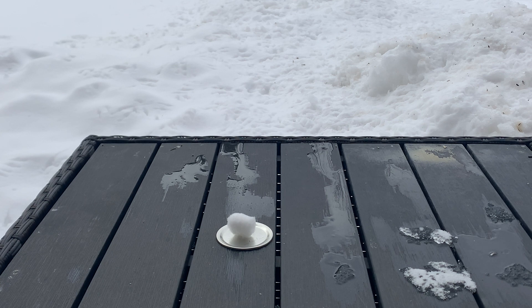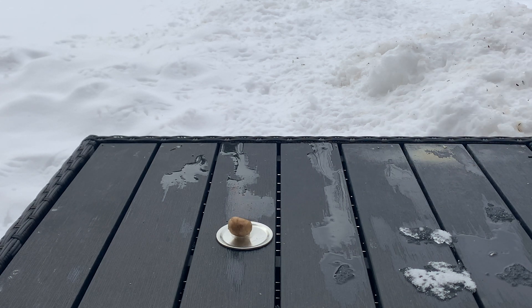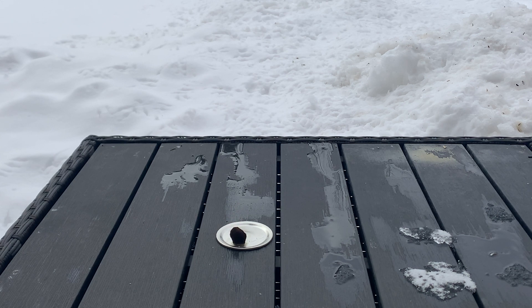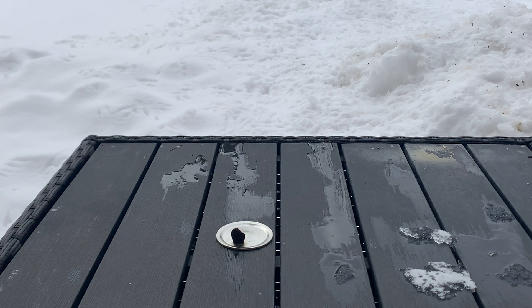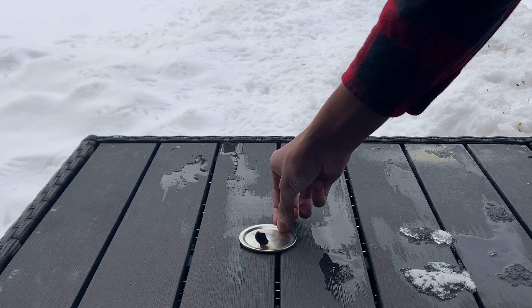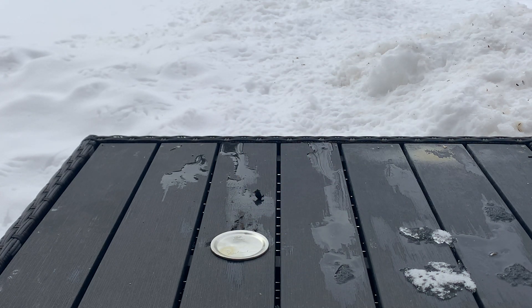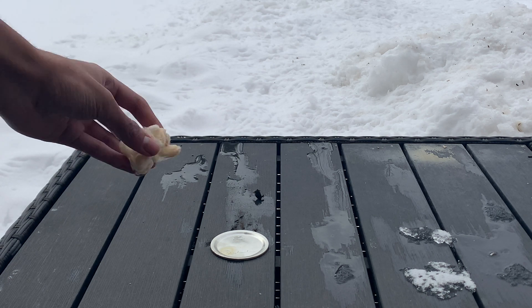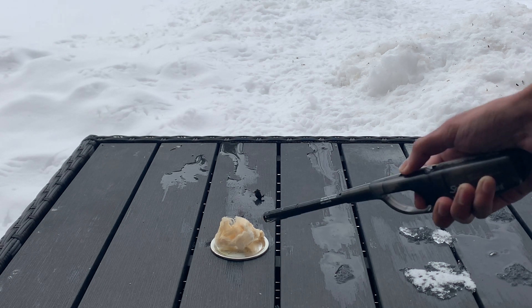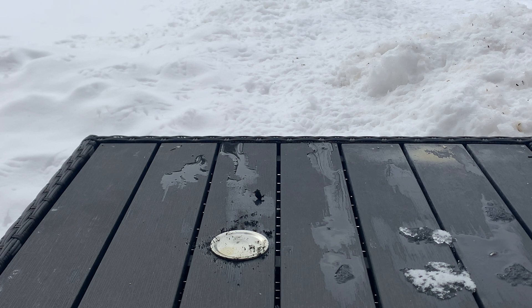The first demonstration I'm going to do is just burning a normal cotton ball — no nitrocellulose, just cellulose. That is a cotton ball burning — nothing spectacular — but it's just cool to compare it to how the nitrocellulose burns. Next we have the nitrocellulose. I got a pretty nice big piece for you guys. Nitrocellulose time. Look at that — it all disappears in a split second. That was really cool. We're definitely going to have a replay on that later.